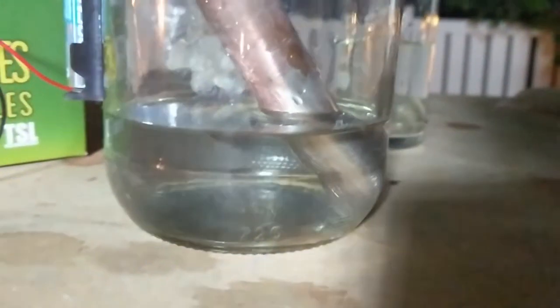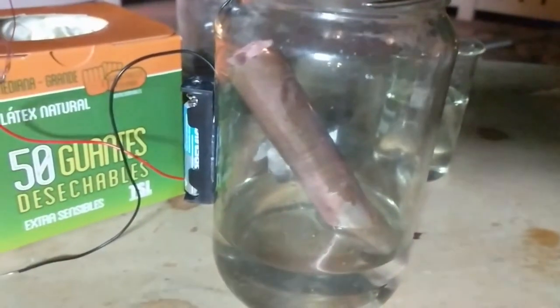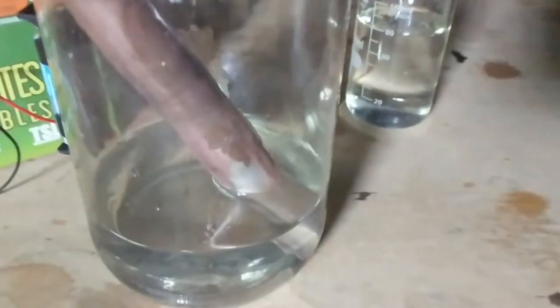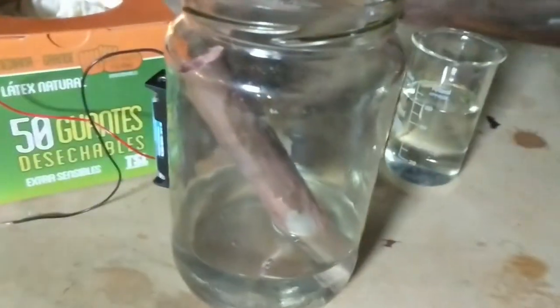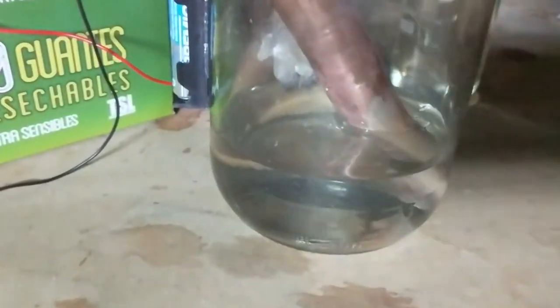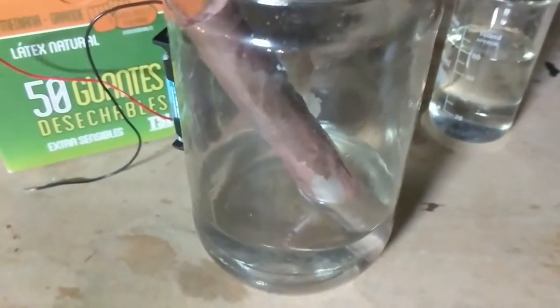This hasn't started yet but you can already see a little bit of silver coating on the copper — probably just a redox reaction between the two, which is pretty common. Anyway, I've got a 1.5 volt battery, connecting the reducing side to the copper — the thing I want to plate onto — and the positive oxidizing side is connected to my two small pieces of silver, about one gram each. I'm making sure only the bottom of the copper connects, because if copper is being oxidized I risk generating cyanogen gas, which I don't want.